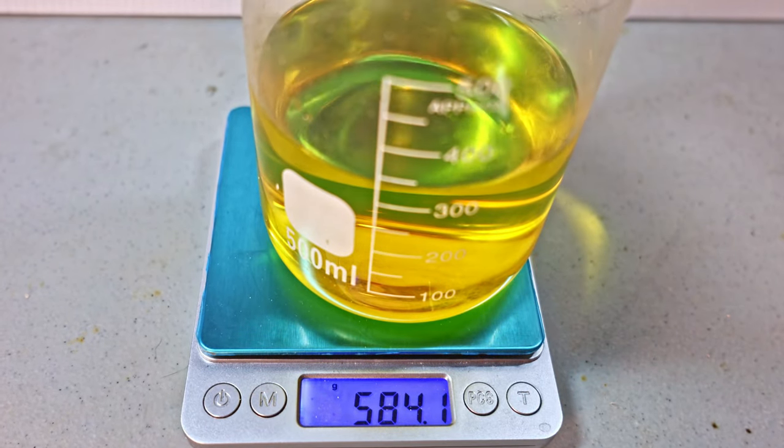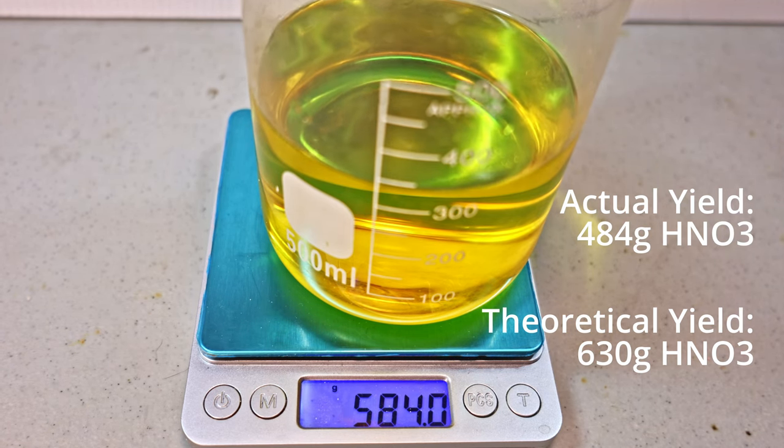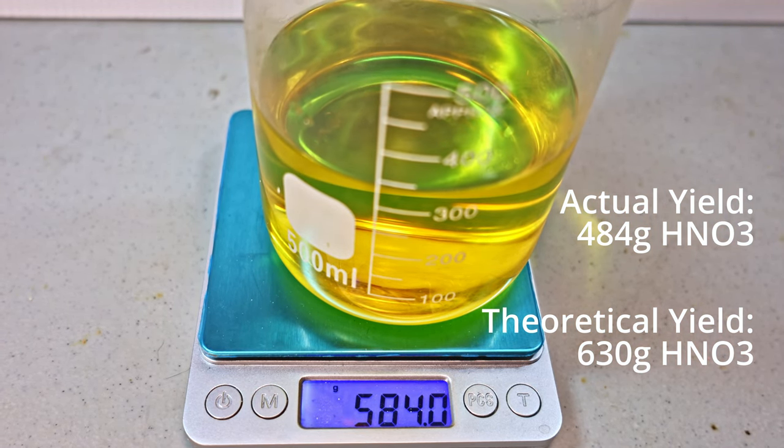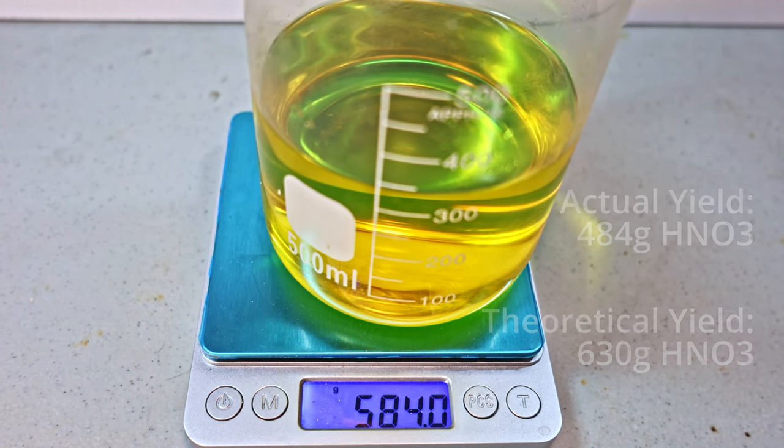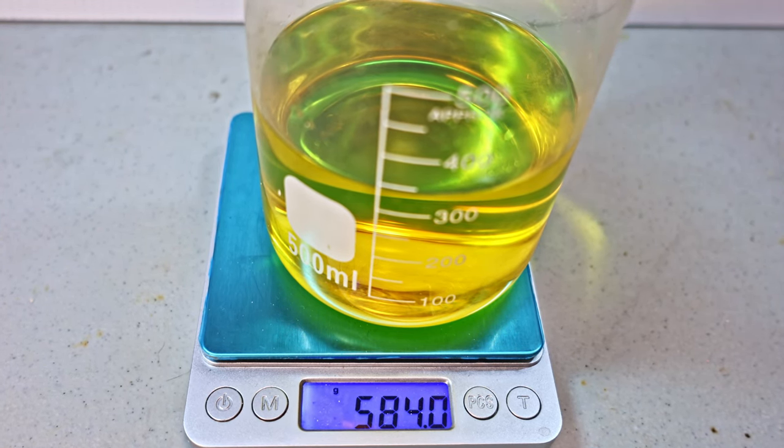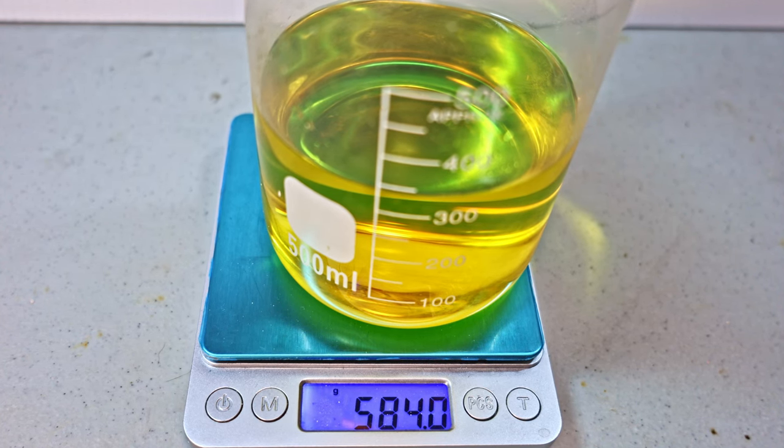584 grams. Now, if we subtract away the beaker and do some fancy math, we come out with 7.7 moles of nitric acid. That is a 77% yield. Very good. Not bad. I would hope it would be better, but still, very good. A lot of nitric acid for what we did.